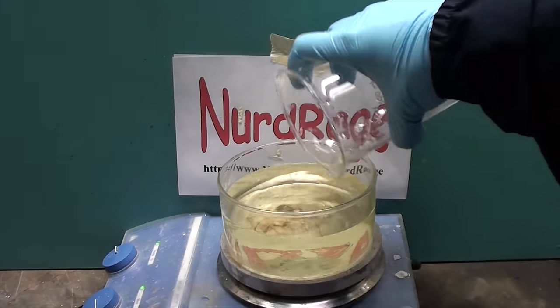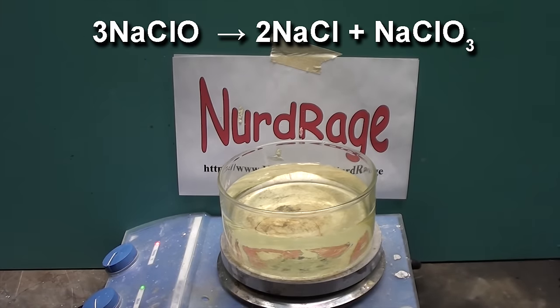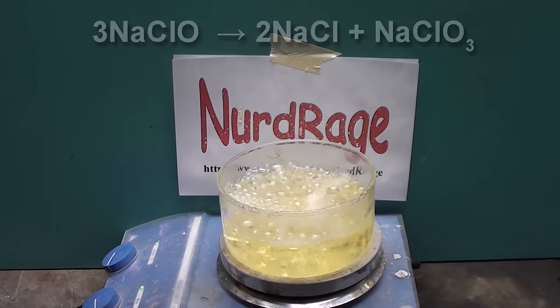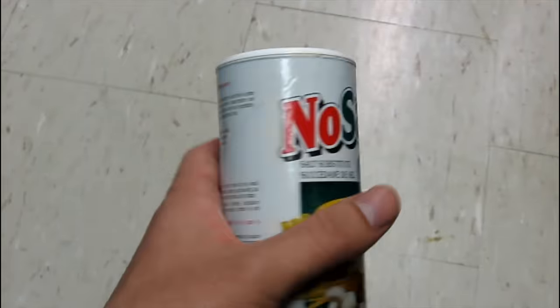Now we've already covered how to make potassium chlorate from bleach in a previous video. While that process is quick and easy, it's not very efficient or cost effective.